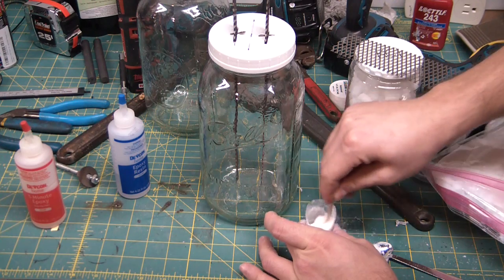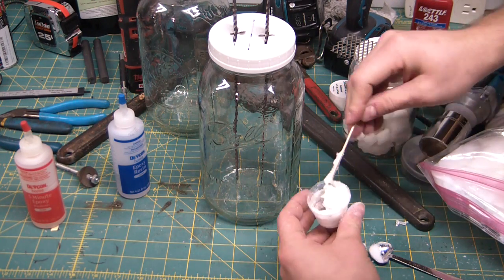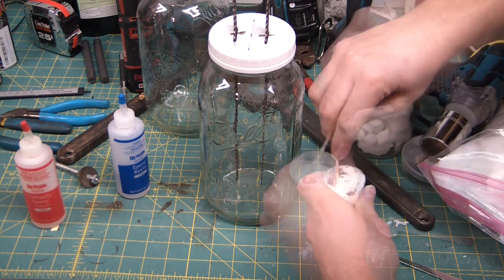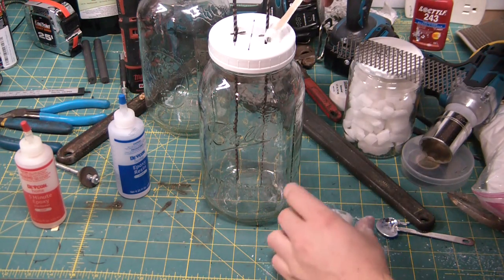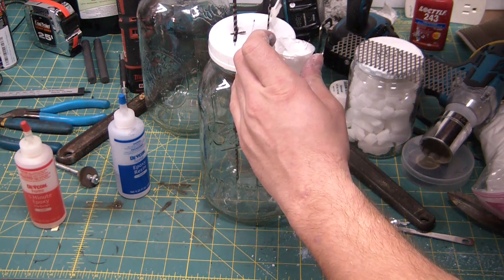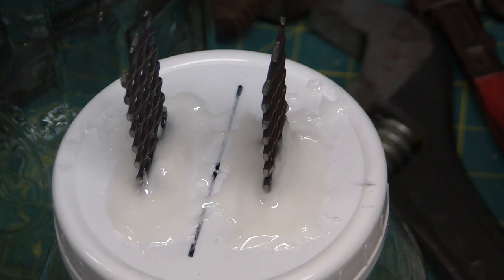Probably should have gone ahead and mixed the epoxy beforehand, but it appears to be alright. All right, that's properly thick. She's about as ugly as they come, but it'll work.